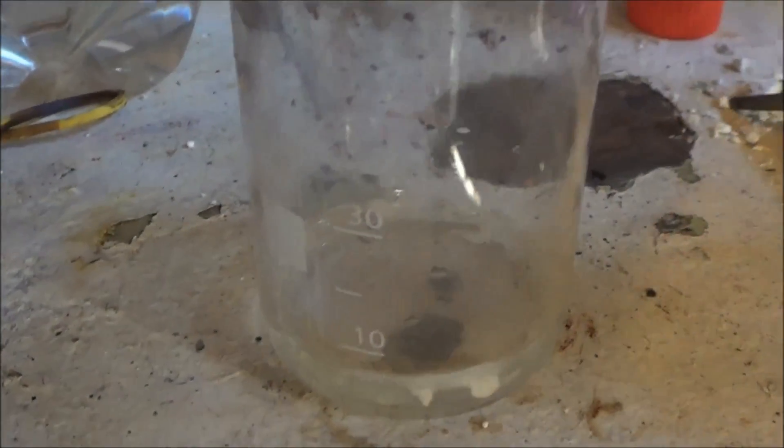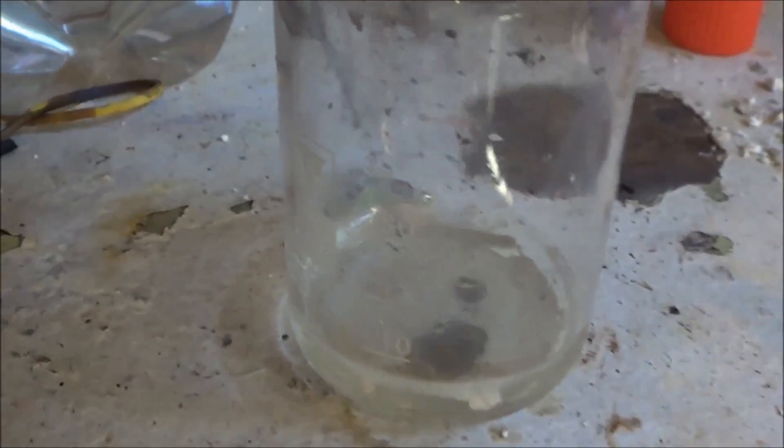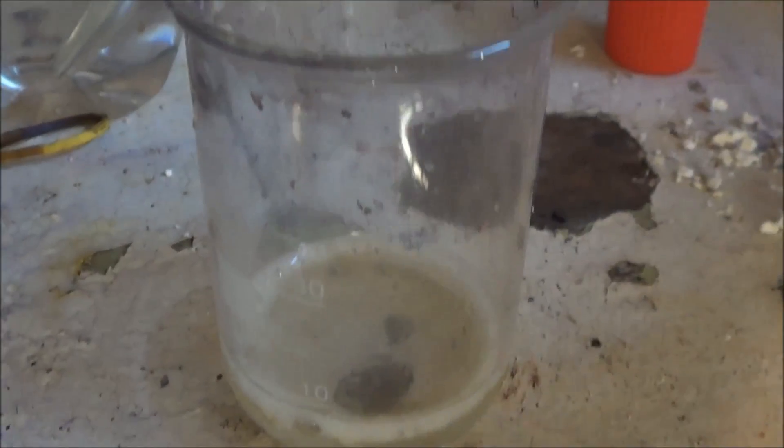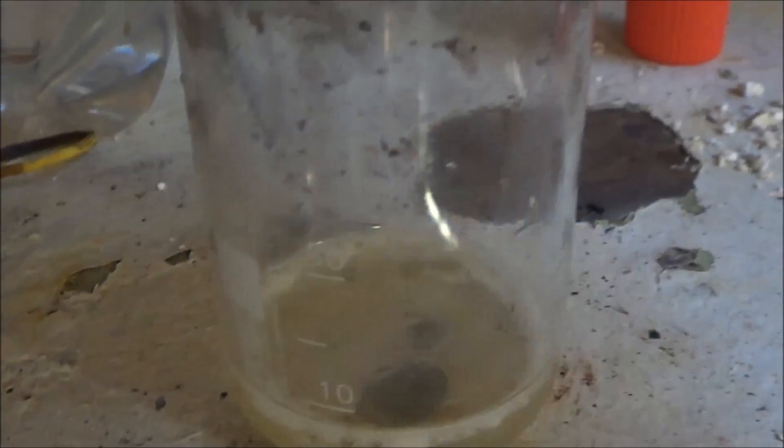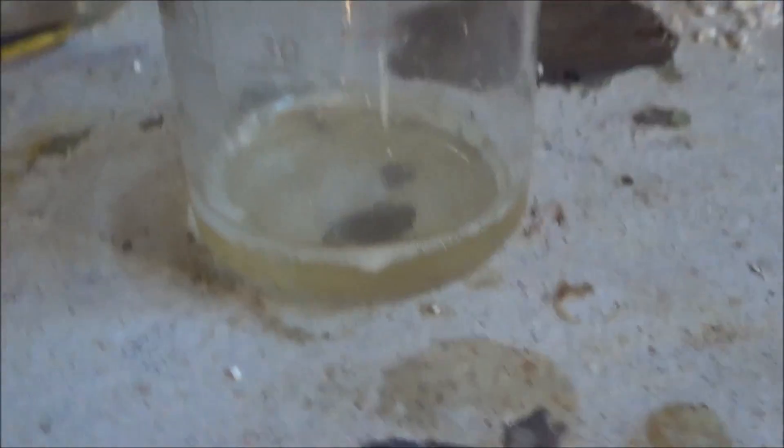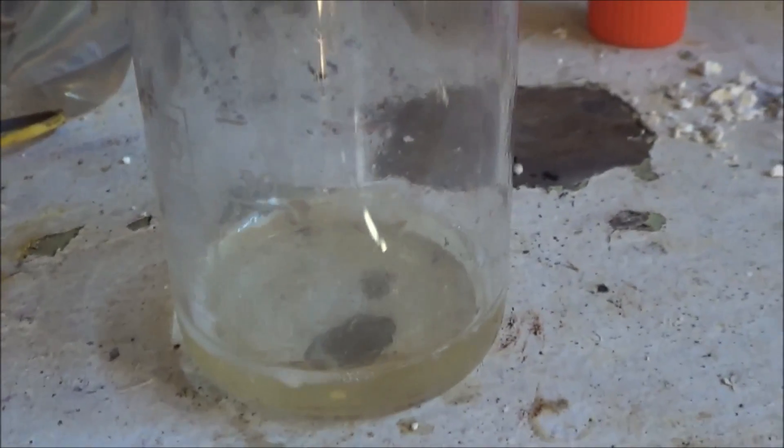Now we have some hydrochloric acid here, and if we add some of our white powder from the paddock, we can see it bubbles quite violently, releasing CO2, so it's calcium carbonate. If it was calcium oxide it would react but it wouldn't bubble like that, so that's a pretty easy test to do.